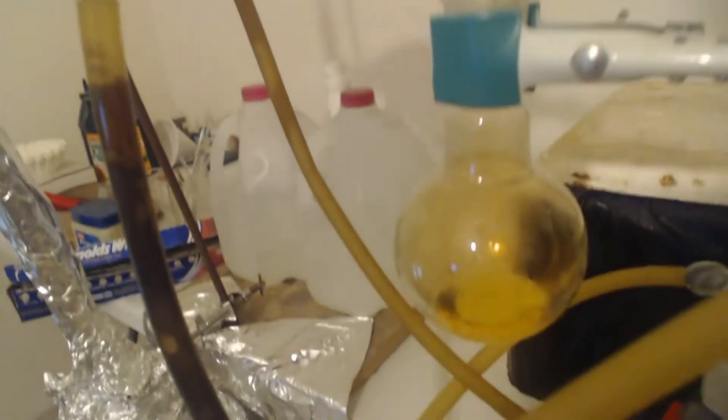Bubbler is going back here, it's still good. This is the suck back trap for the bubbler. It's actually about 80 degrees right now, it's going to slowly go up to 83. It's coming over right now though. And you can see the more I have distill, the less NO2 I have, I mean the less nitrogen oxide gases I have in the apparatus. See how the bend here is gone, there's nothing in the condenser. You want to make an acid, you usually get the salt of the acid you want. I got potassium nitrate because I want nitric acid. And I dripped a stronger acid on it, in this case I chose sulfuric acid.